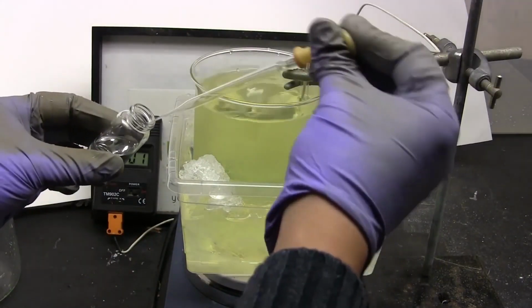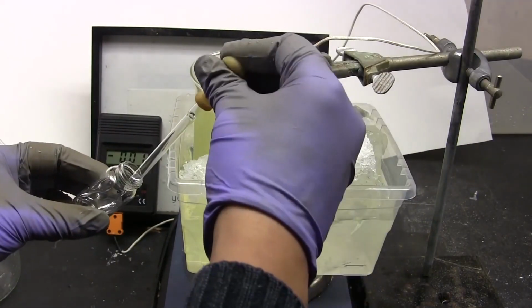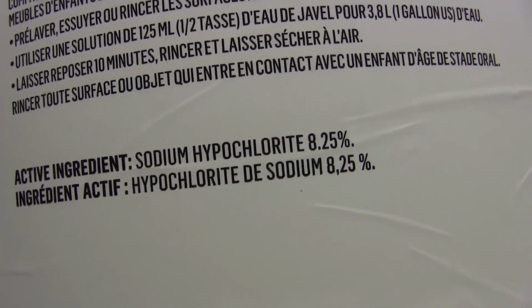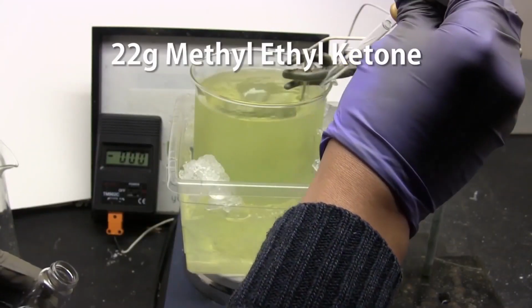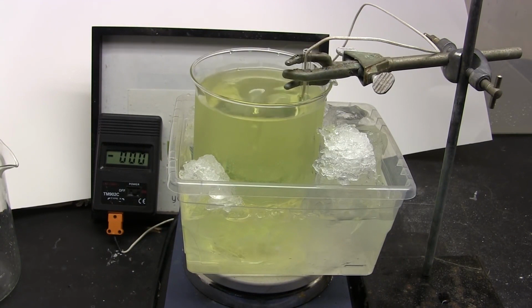Most amateurs that do this reaction use acetone, but I'm going to use methyl ethyl ketone, also known as 2-butanone. Now the bleach I bought claims to be 8.25% sodium hypochlorite by mass, but I only found about 7% through titration. So I'm going to add a total of 22 grams of methyl ethyl ketone. Now there is an induction period between adding the ketone and when the temperature spike occurs, so don't add it all at once thinking nothing is happening, as the reaction will boil out of control when it finally does start up. But don't take too long either, as the chloroform produced decomposes under strongly alkaline conditions.